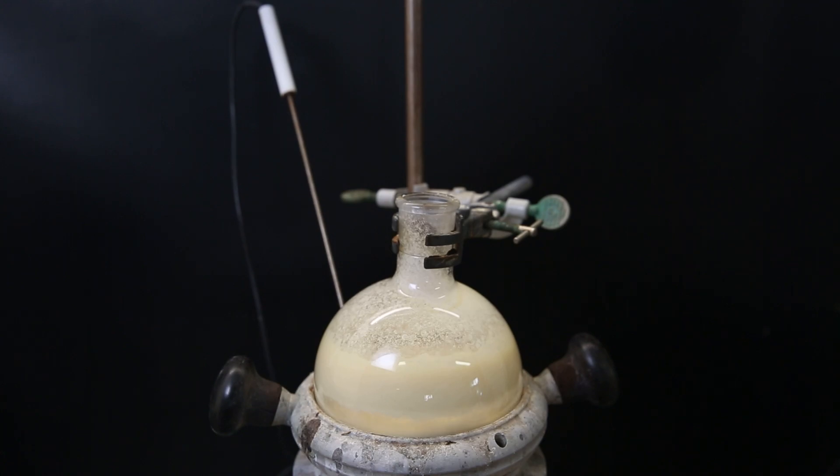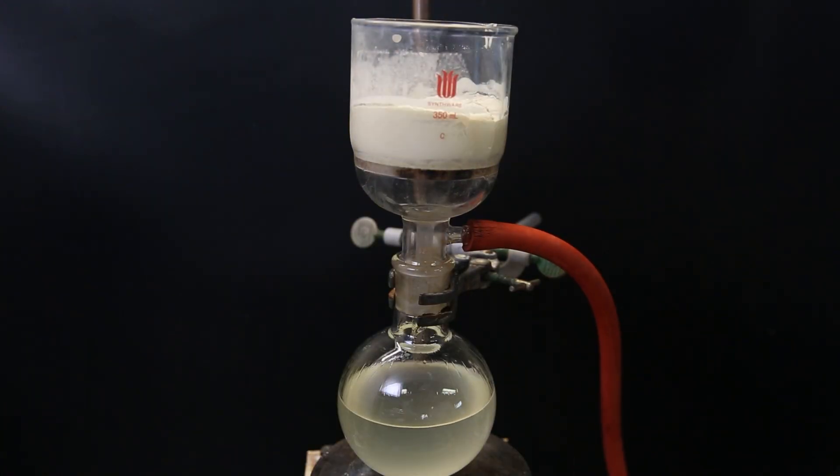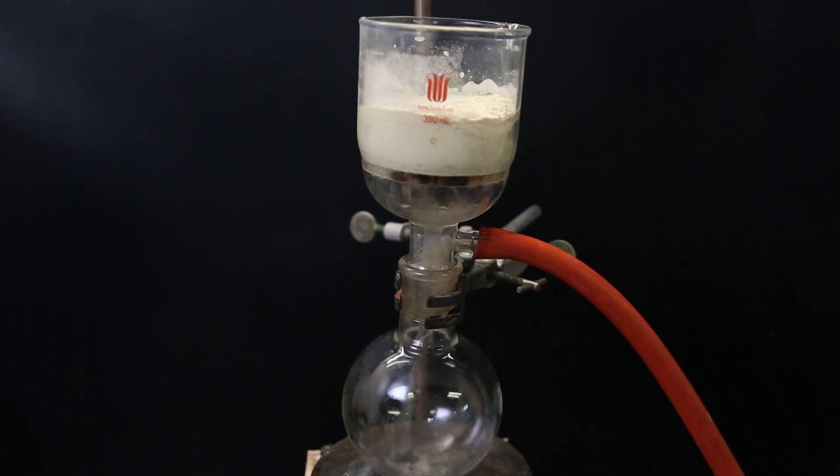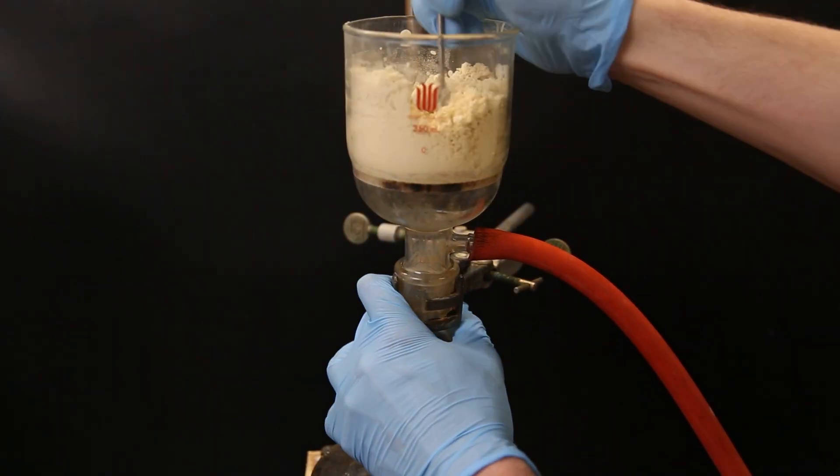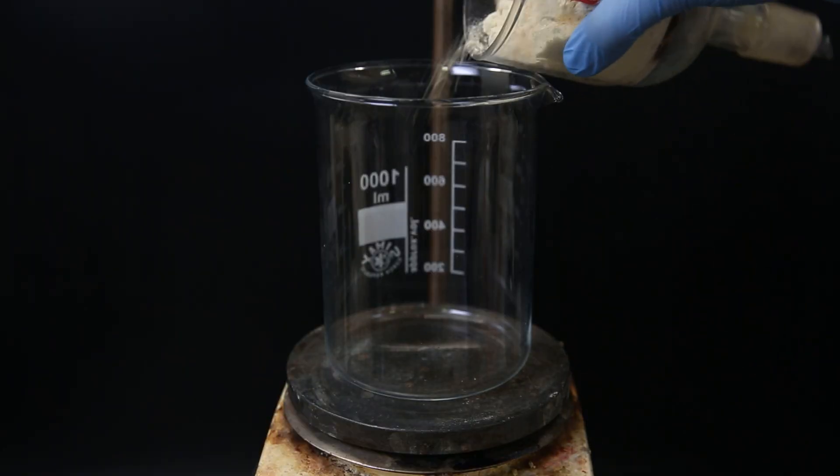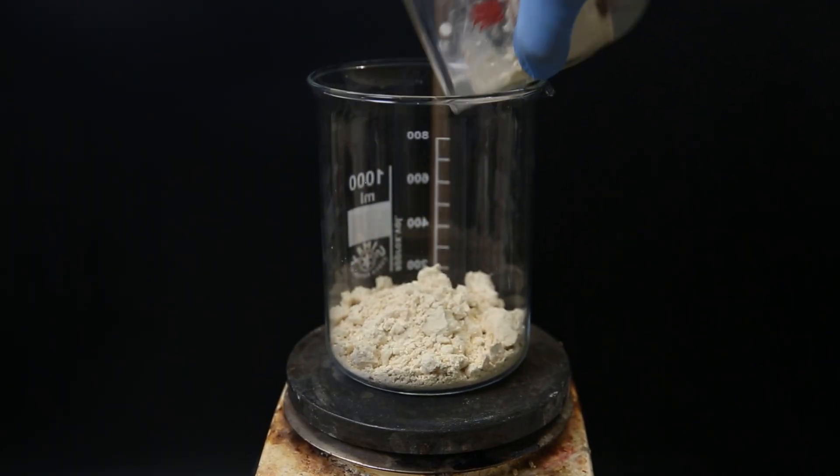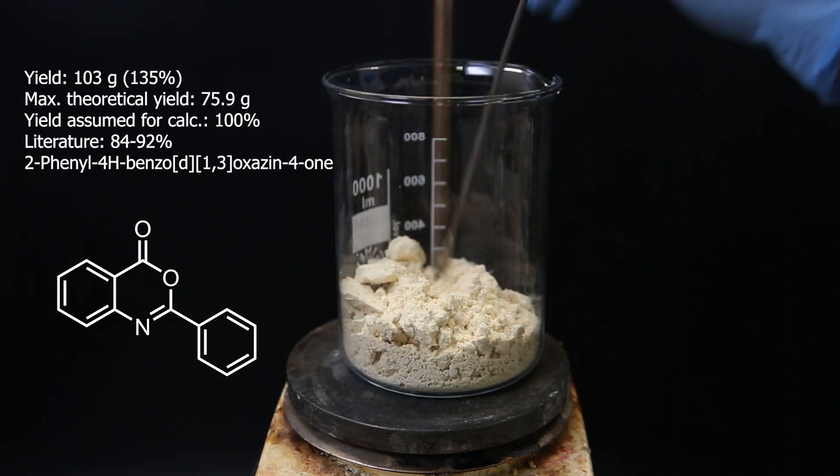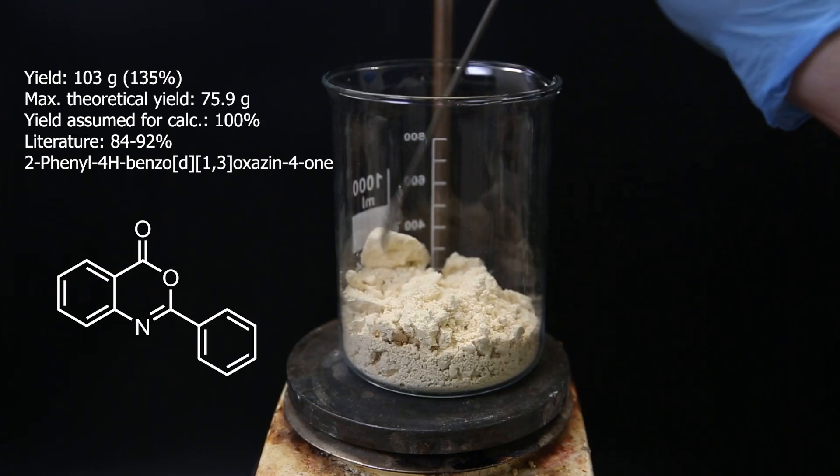When that's done, I set it up for vacuum filtration to collect all the solid and wash it with more hexane. I dry it on the filter by pulling a vacuum constantly, which will evaporate the remaining hexane. I then pour the powder into a beaker, and evident by its weight, it still contains some remaining solvent. Or, I have created mass out of nothing. Both are equally plausible.